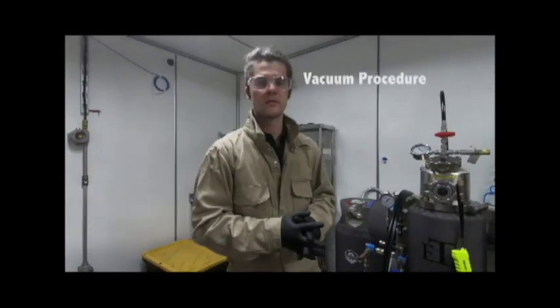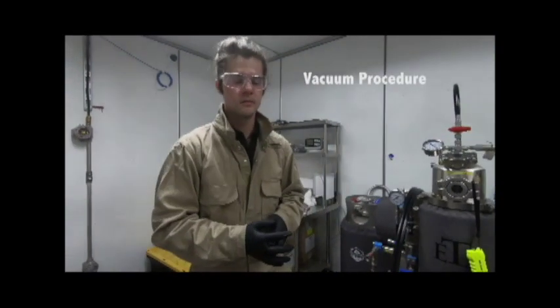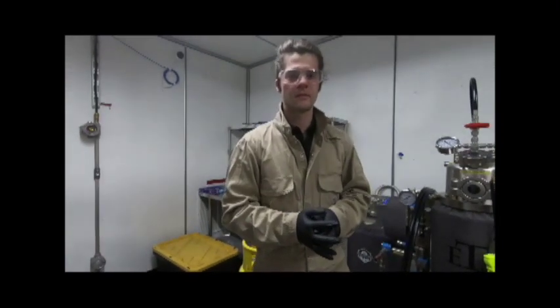Okay, so we are going through the vacuum procedure. Number one, turn on air compressor.